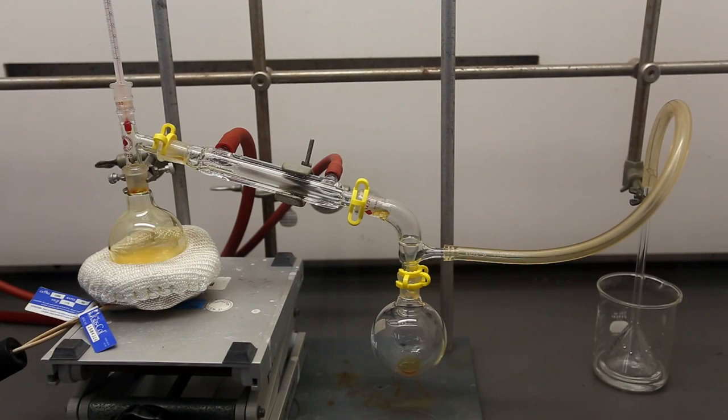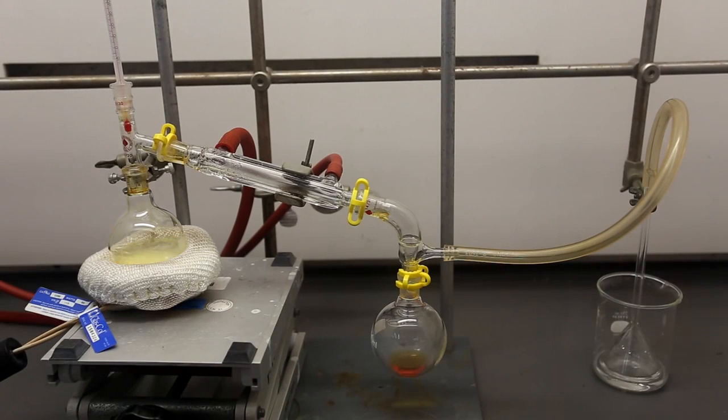Let the distillation run on maximum heat until no more distillate comes over. In this distillation, both aqueous and gaseous hydriodic acid will be produced. The collecting flask is used to capture the aqueous portion, whereas the trap is used to capture the gaseous portion.